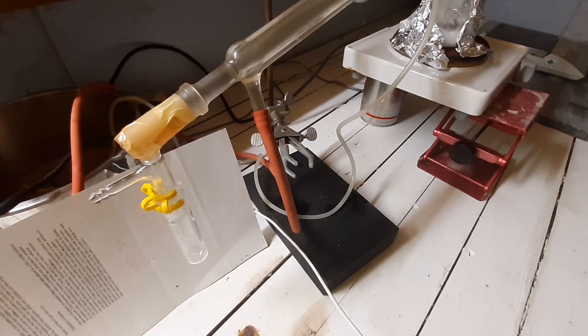Welcome back. Today we'll be distilling nitric acid from sodium bisulfate and ammonium nitrate. This is a nice follow-up. Sodium bisulfate is sold as a pool chemical—it's a pH minus—so it's set up for a simple distillation.